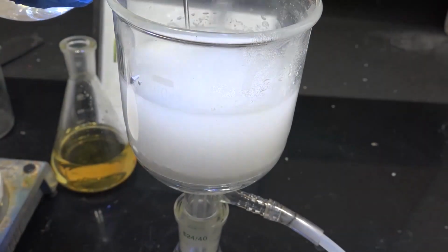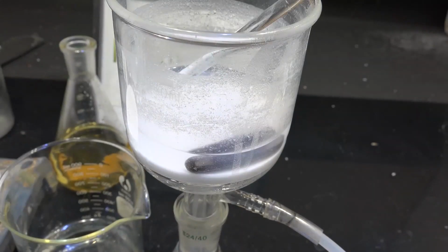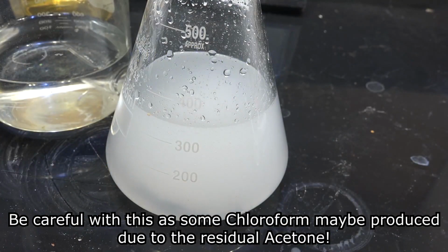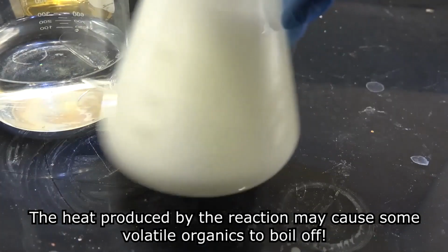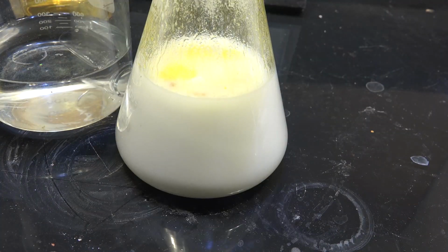We now dissolve the residue in water. These salts contain unreacted cyanide and we should deal with that first. Once it's all dissolved, we add an oxidant like bleach or hydrogen peroxide. I'm using sodium dichloroisocyanurate, which is a highly soluble form of pool chlorine. The idea is to convert the cyanide into relatively harmless cyanate. Once again, make sure you're doing this in a fume hood.